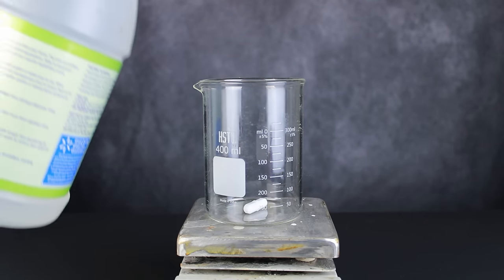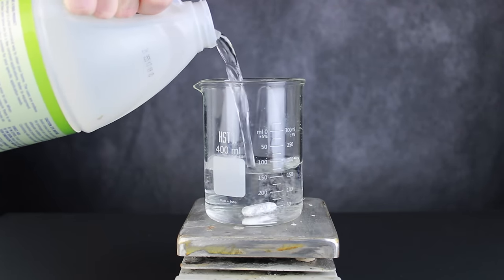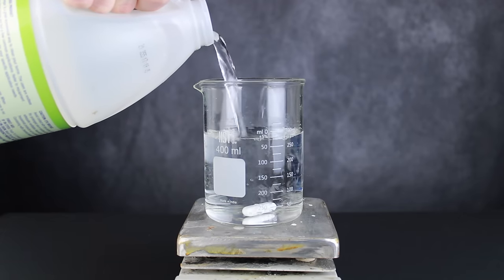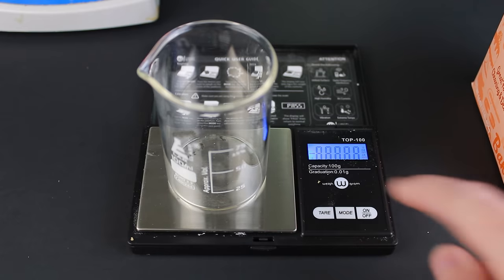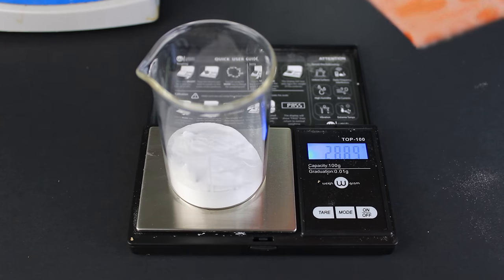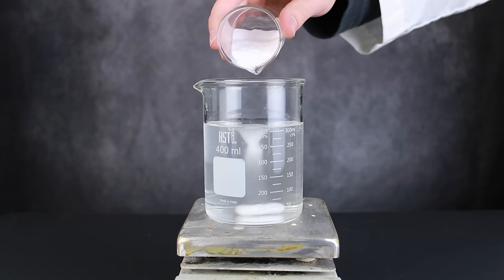To start, I filled a beaker with about 300 milliliters of 5% acetic acid, otherwise known as common white vinegar. In total, we will need 400 milliliters, but my beaker could only fit 300 mils at a time. Next, 28 grams of sodium bicarbonate was weighed out on a scale. This was gradually added to the vinegar with strong stirring to prevent excessive foaming.